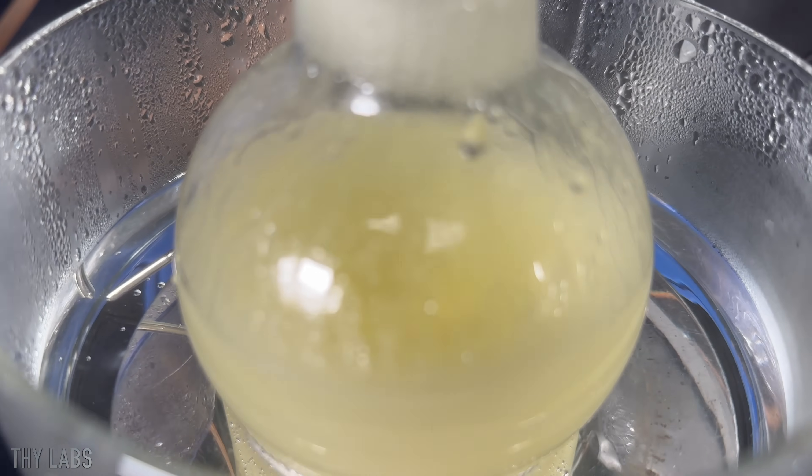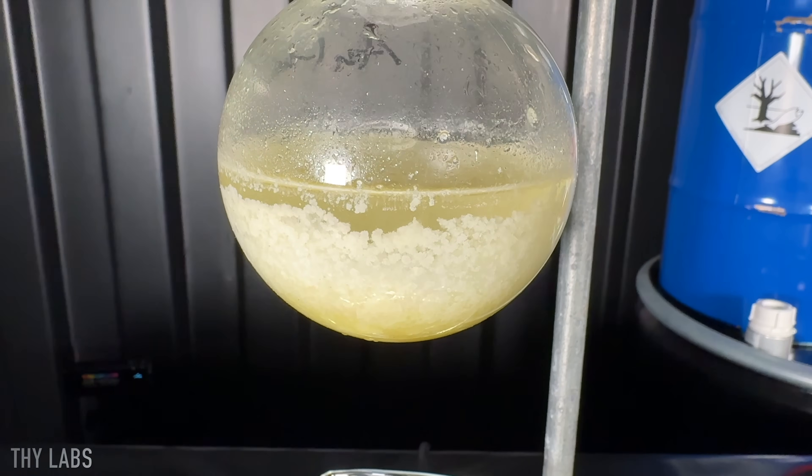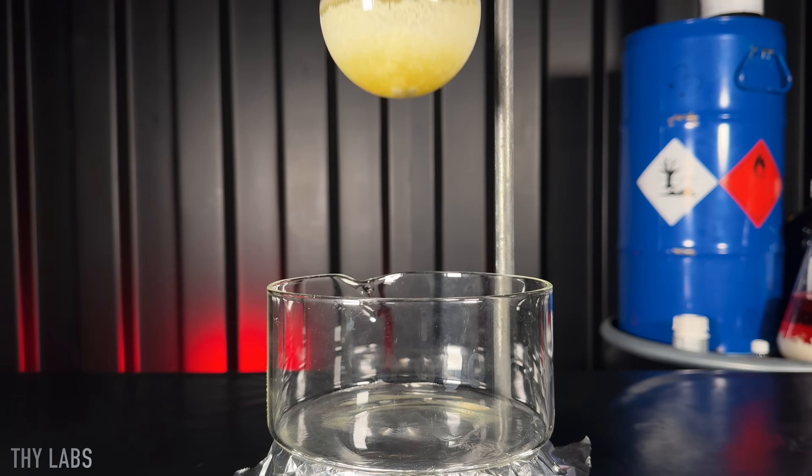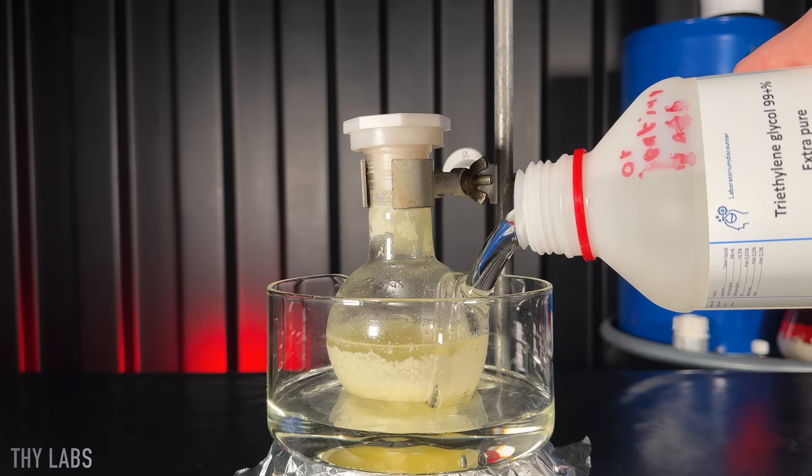I heated it for about 8 hours at 90 degrees Celsius, which led to the solution forming. While it cooled down, it formed a bunch of white crystals. I decanted off the acid solution, filled it back up with distilled water and set up another hot bath.